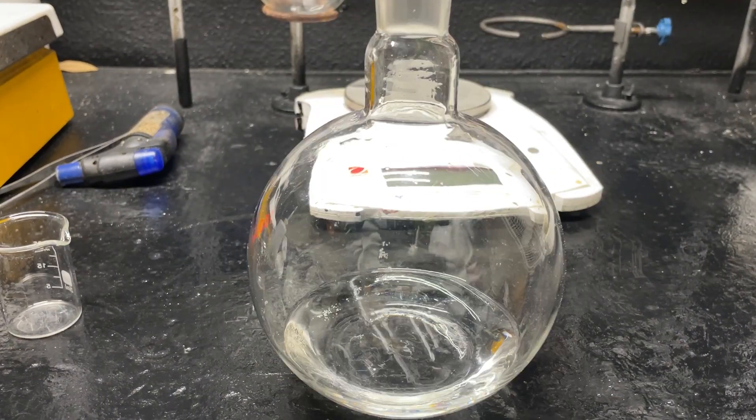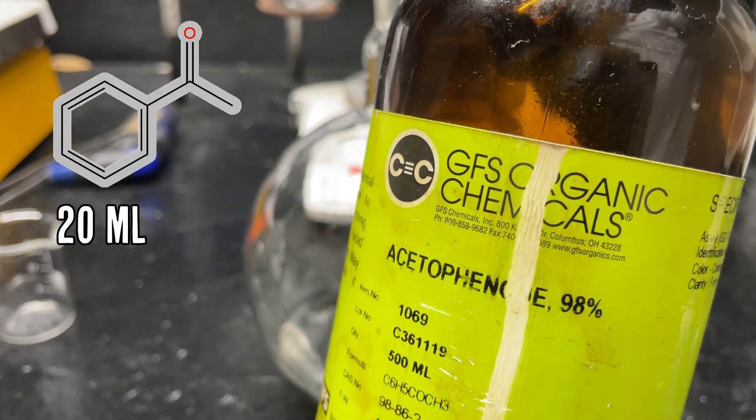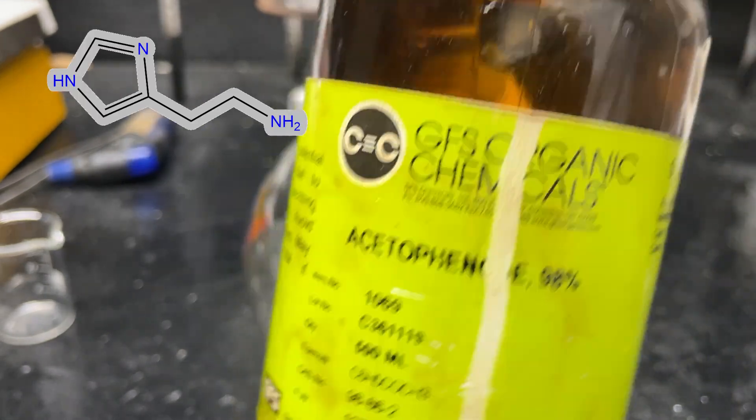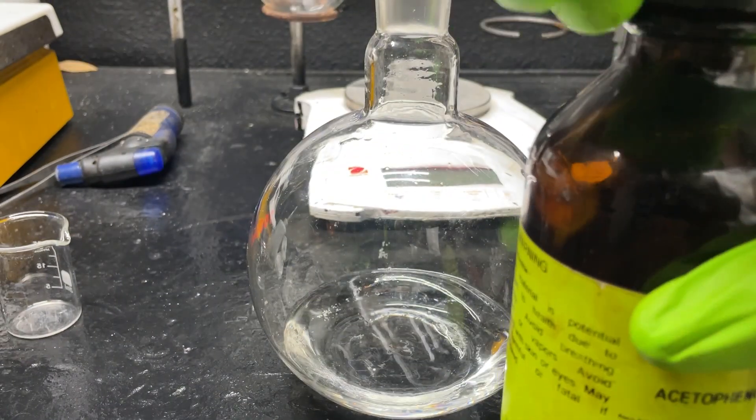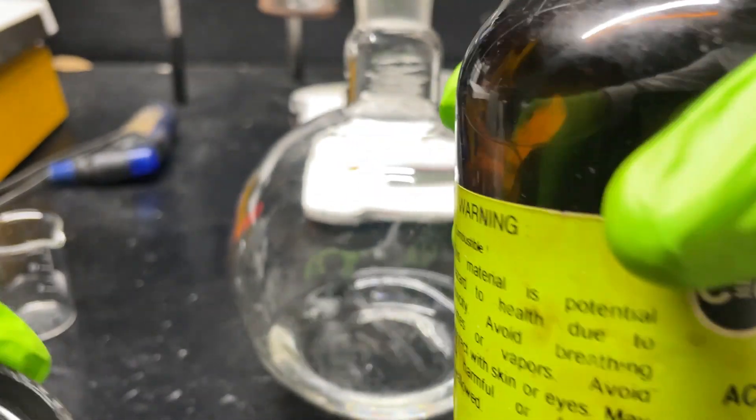And now for our mace we also need acetophenone. You've probably seen this plenty of times in my videos before - I use this to make histamine, the essence of allergies, and serotonin. But we're also going to be using it to make mace. What a versatile chemical here.